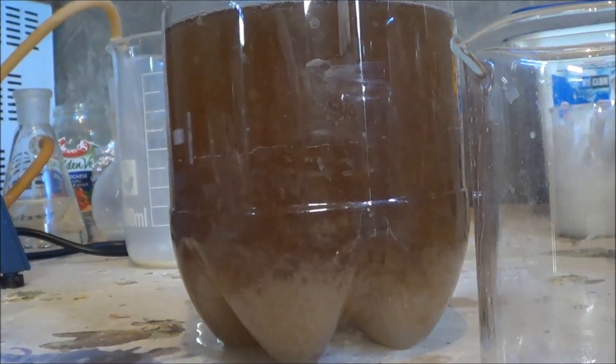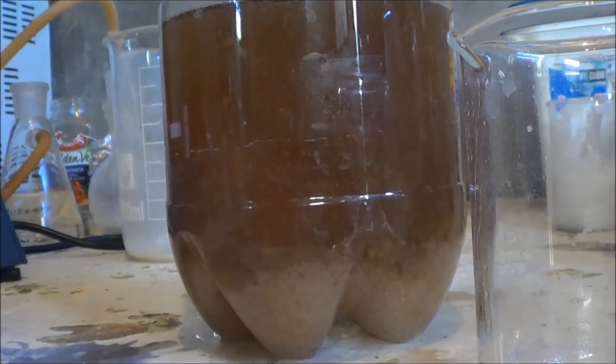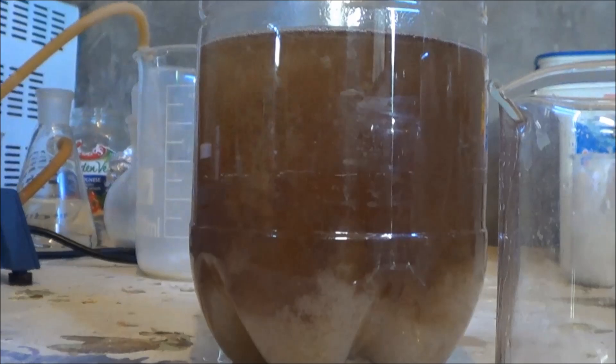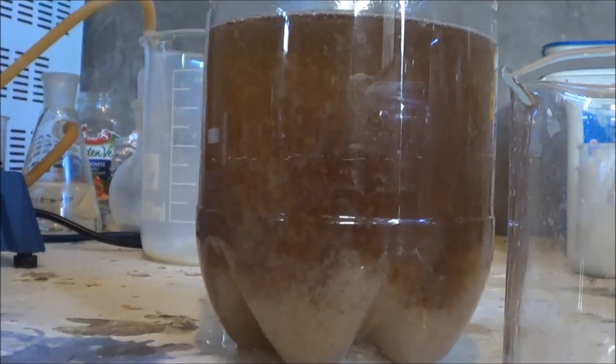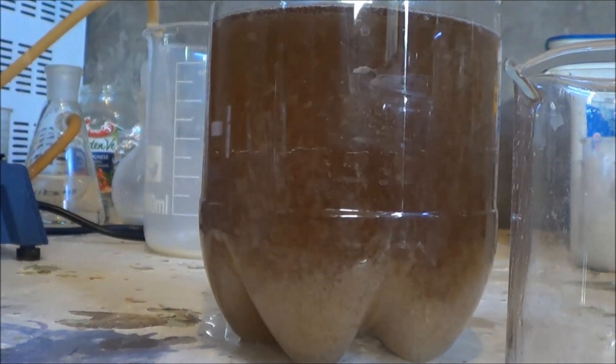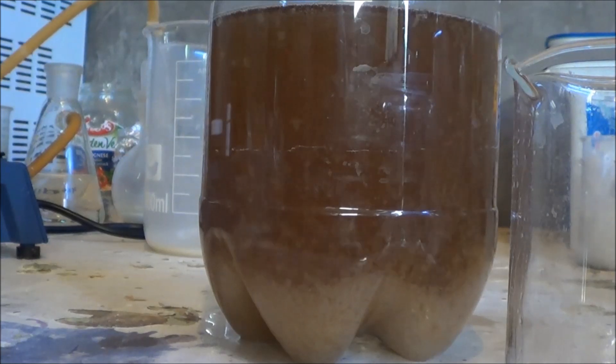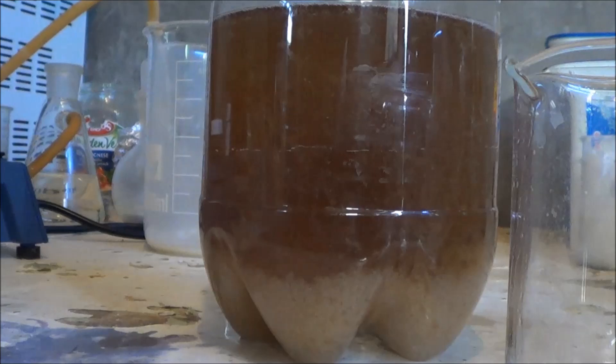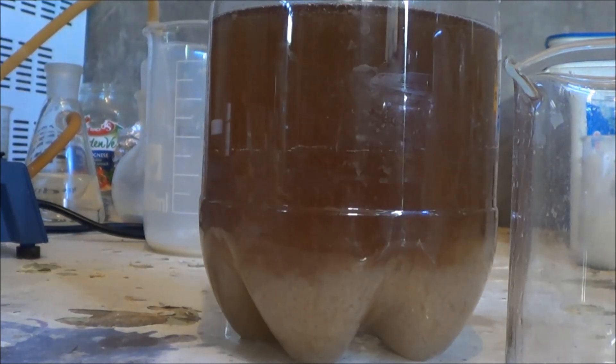You can see our, what I'm hoping is our hydrazine sulfate starting to fall out of solution. It's looking about what I expect it to look like from experience, so that's good. It's still very hot, this solution, so it's still got a lot more to precipitate out. It's reasonably insoluble, but it does have some degree of solubility, so cooling it down is needed to get it all out.